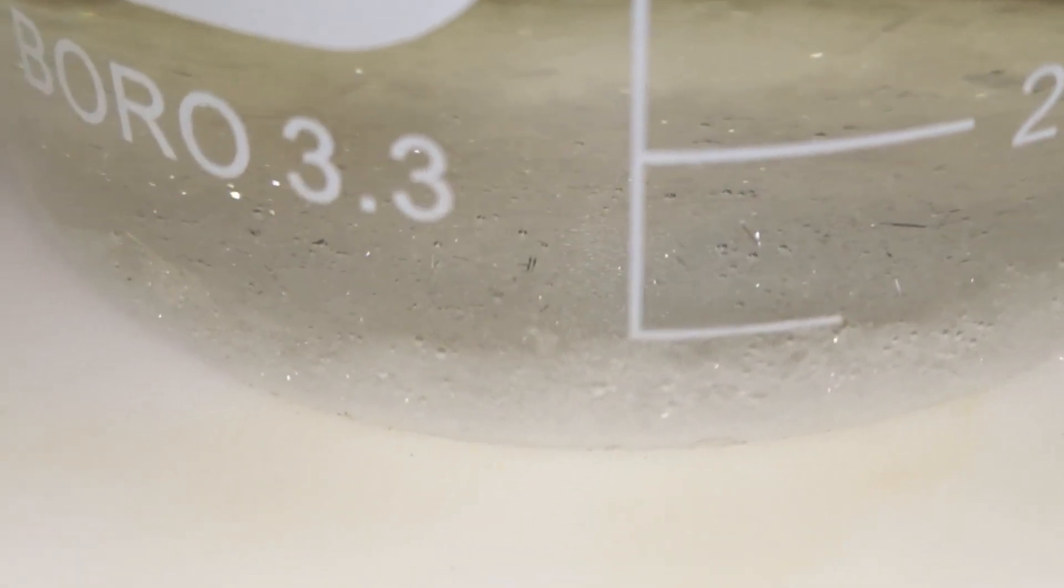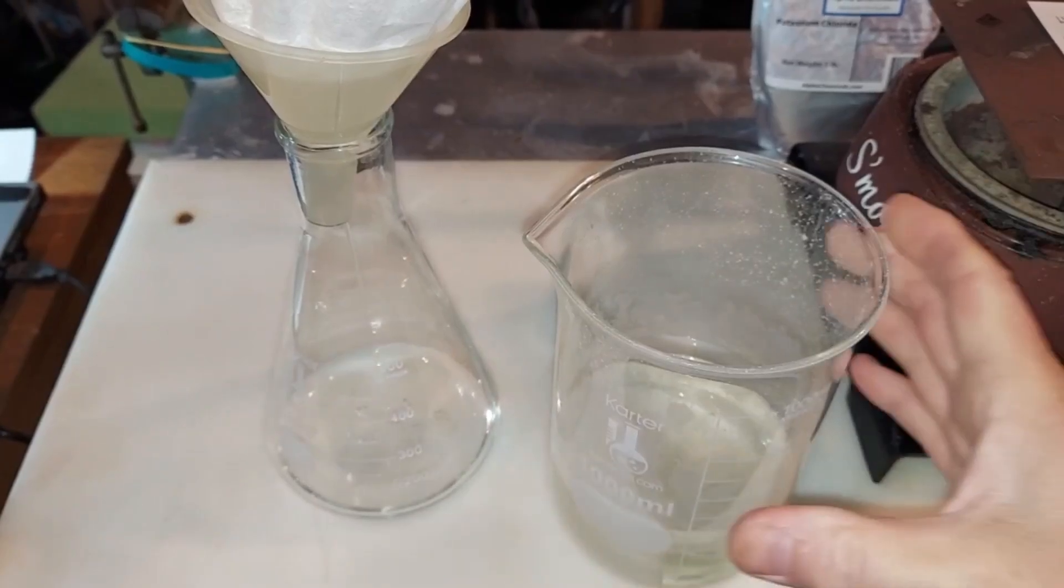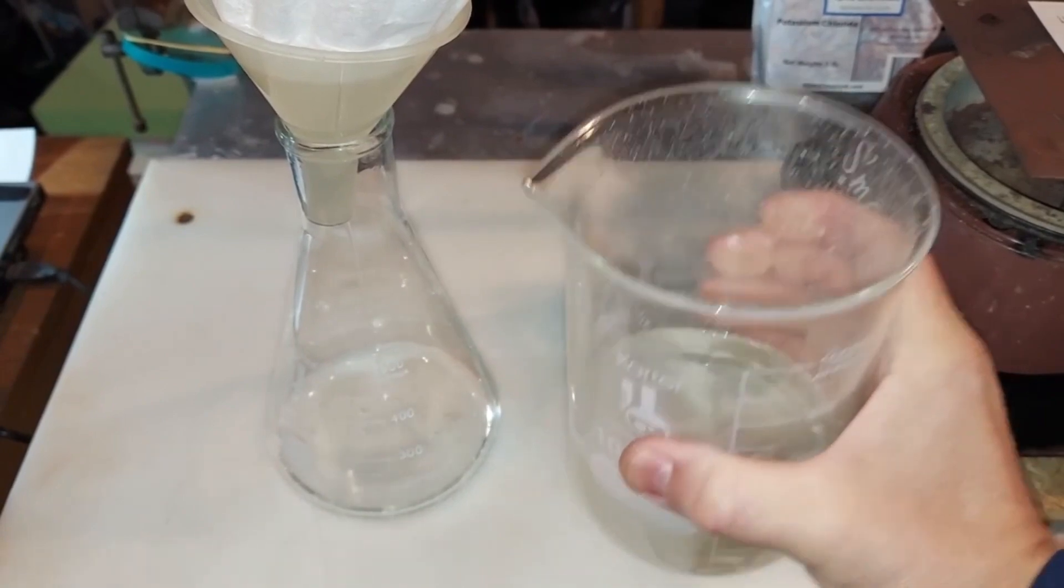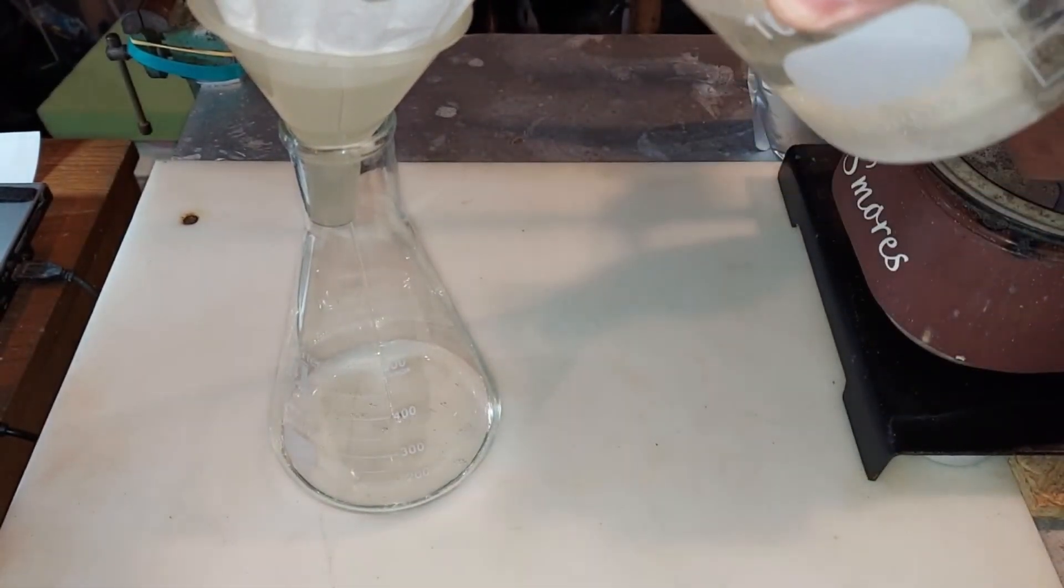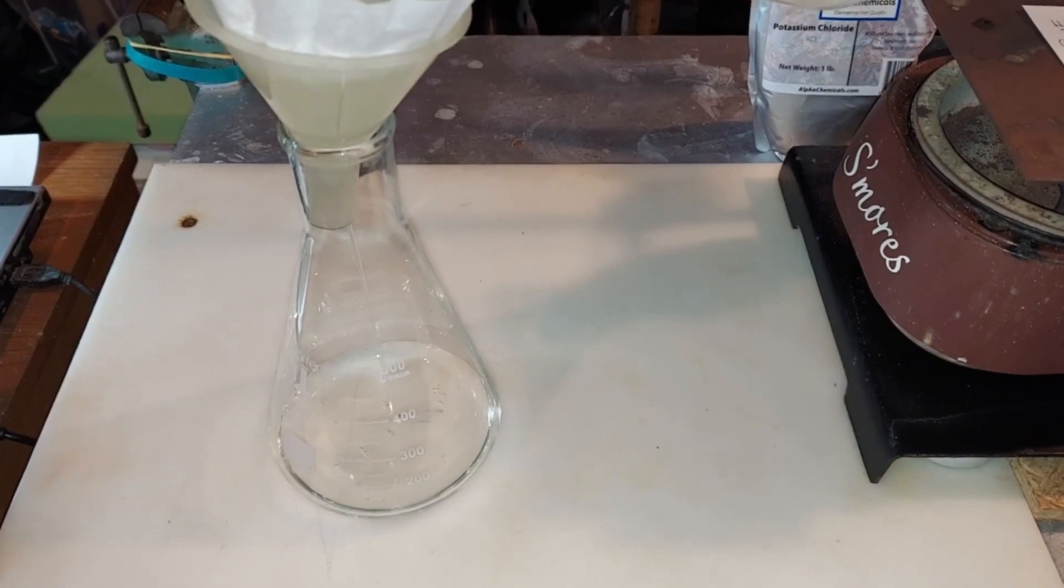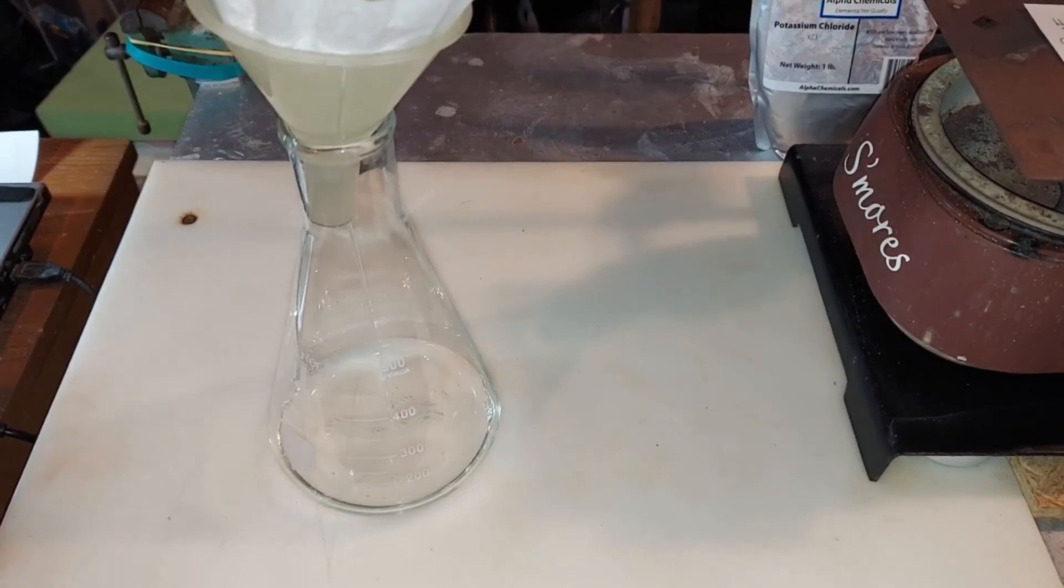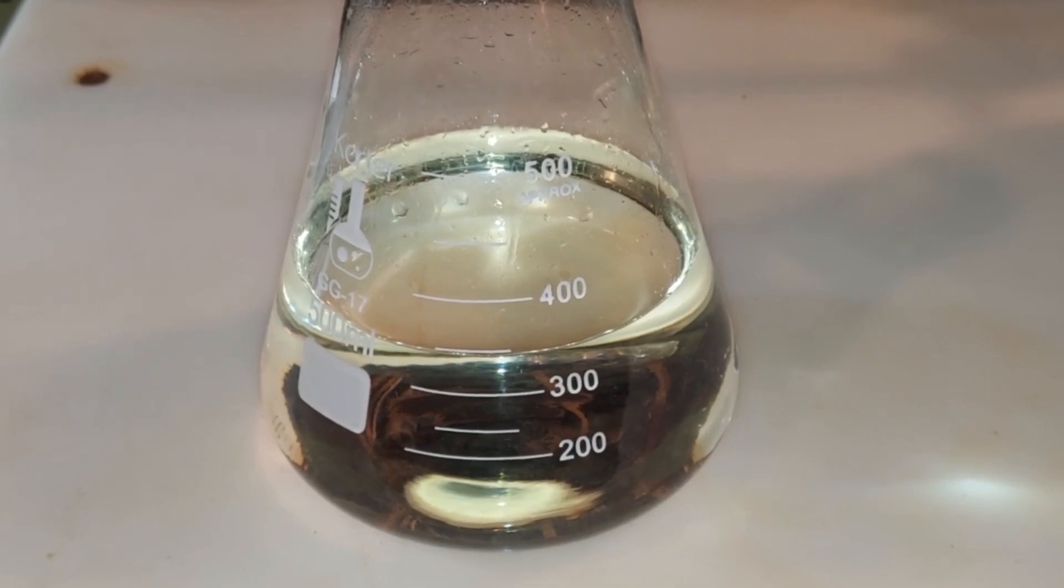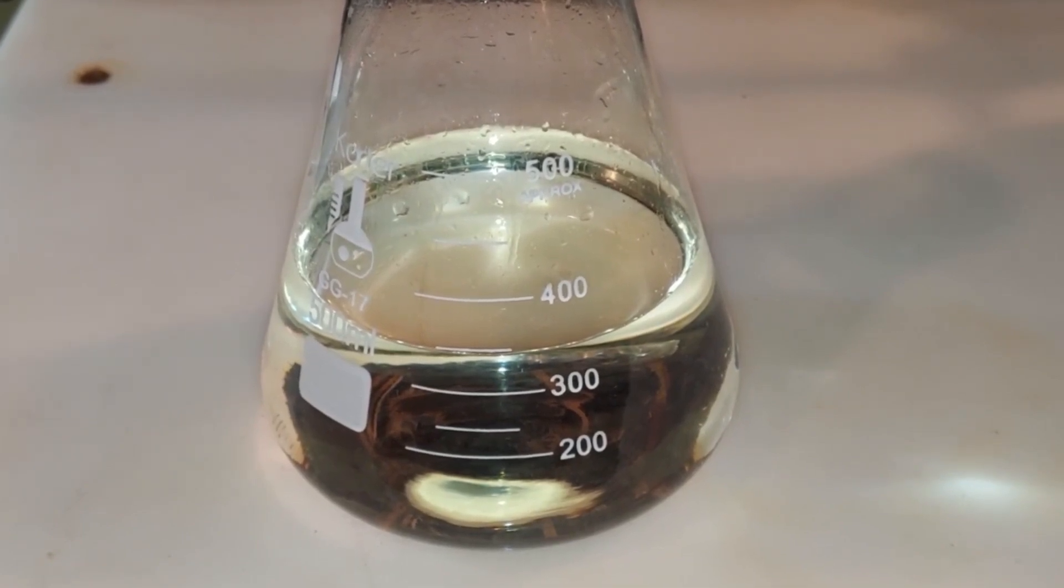The amount of salt in here and that some of it's floating on the top, I've decided to filter it to remove the salt because what we need, which is sodium chlorate, is still in solution. This is the sodium chlorate solution. I ended up with around 350 milliliters.